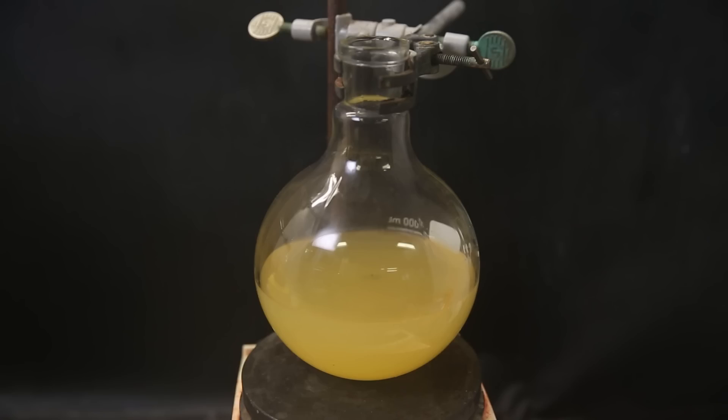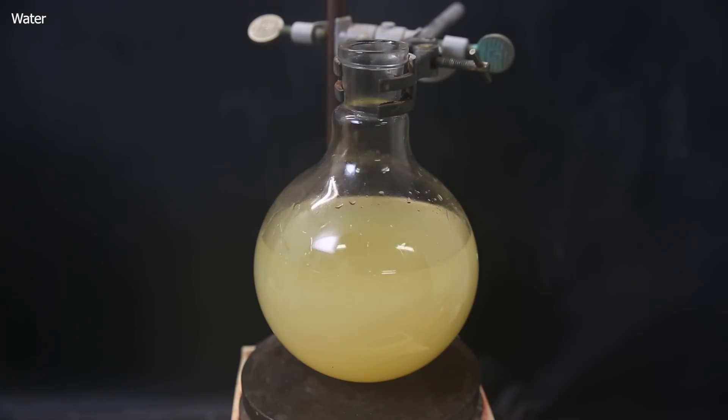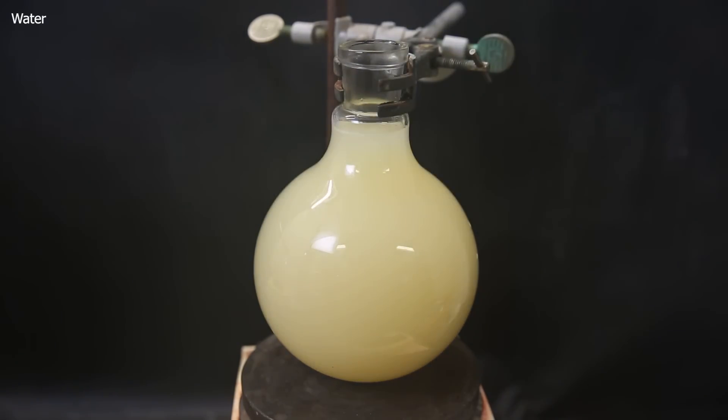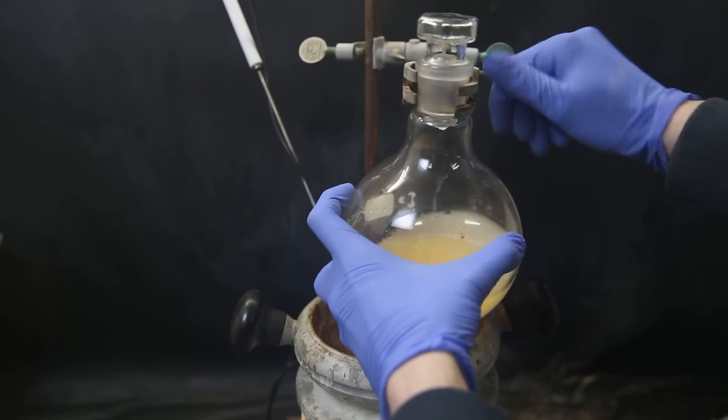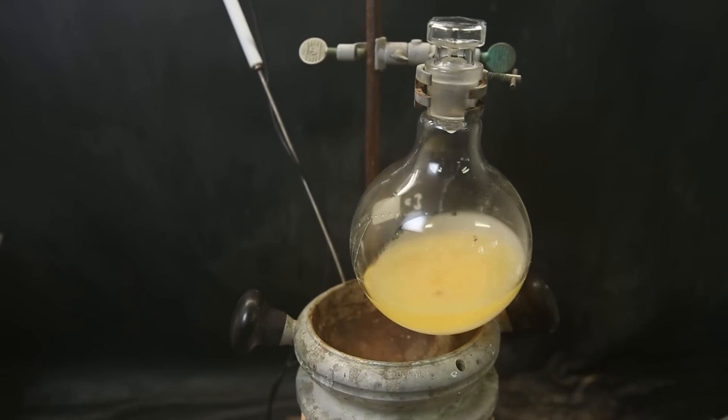In the end, I transferred all of the solution to this flask, but I used way more ethanol than I needed, because I thought it wasn't dissolving, but actually the cloudiness of the solution is normal for barbiturates. Also, they gradually degrade in solution. I tried to precipitate it all by adding water, but there was way too much ethanol, so I ended up just distilling most of the liquid off, and after letting it sit in the fridge, it settled in an ugly manner to the bottom.